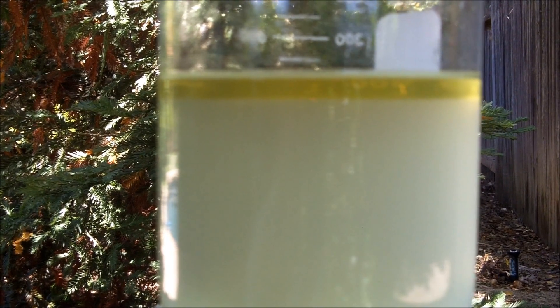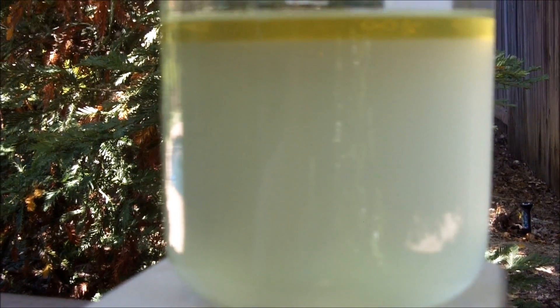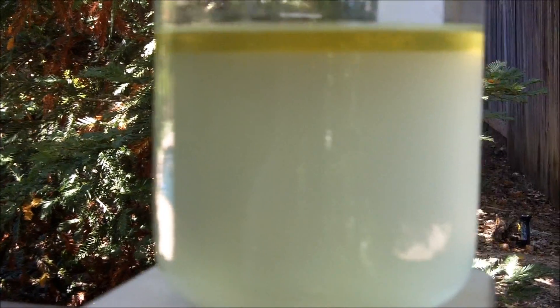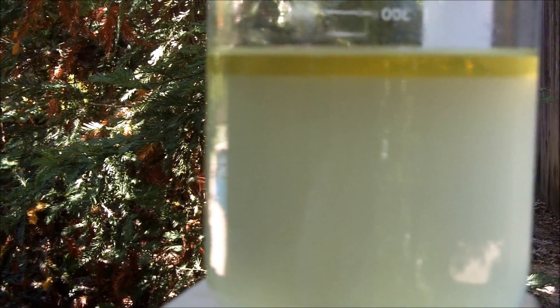Immediately after I stop stirring, you can see two layers are formed. The top containing methyl ethyl ketazine. The bottom one is still cloudy, as you can see, so I am going to wait for that to clear up and fully separate out. And then I will use a sep funnel to decant off that top layer.